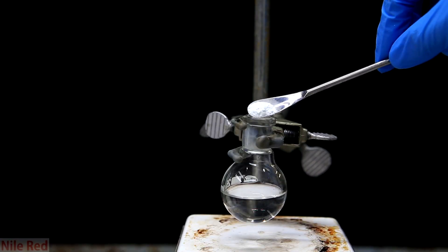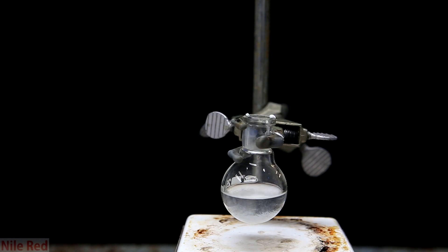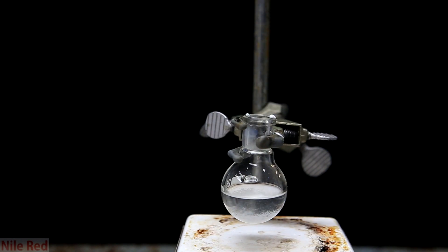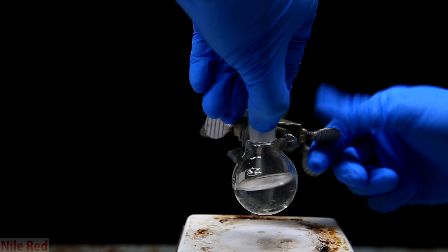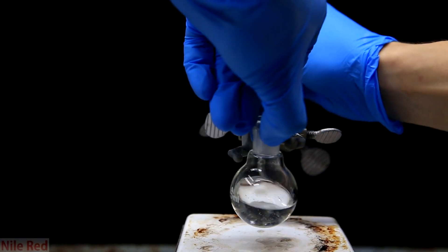To really dry and pull out the last little bit of water, we add a little bit of magnesium sulfate. We swirl it around over the magnesium sulfate until we see that it's dry.